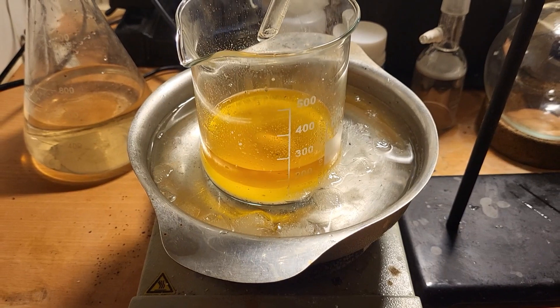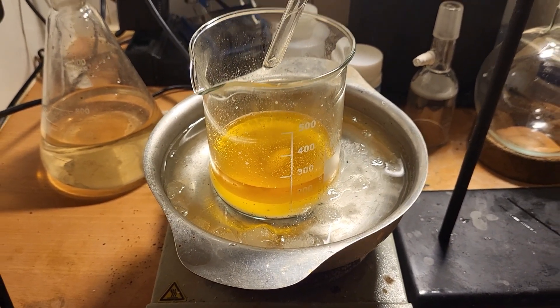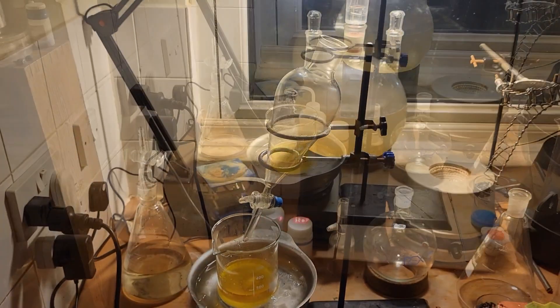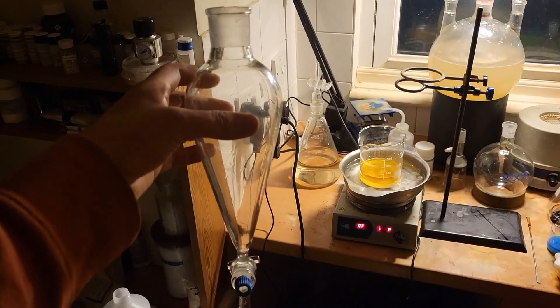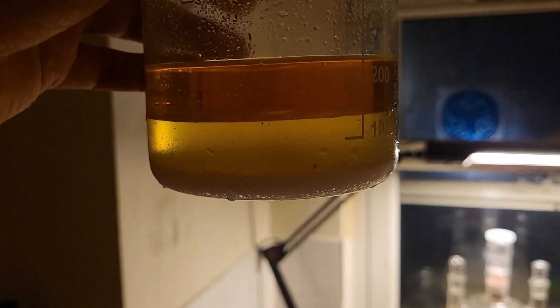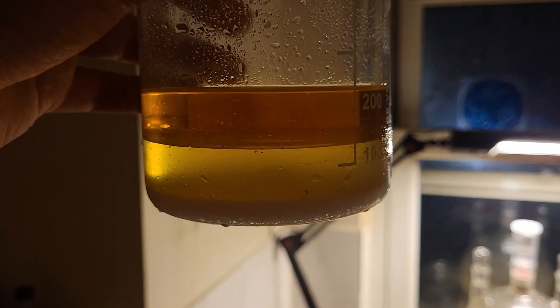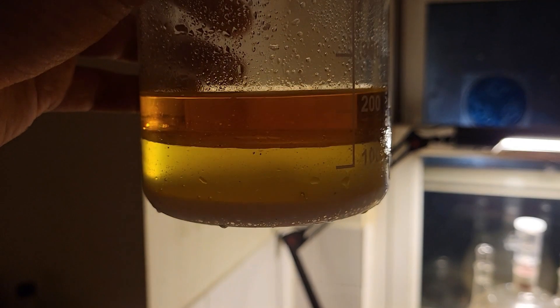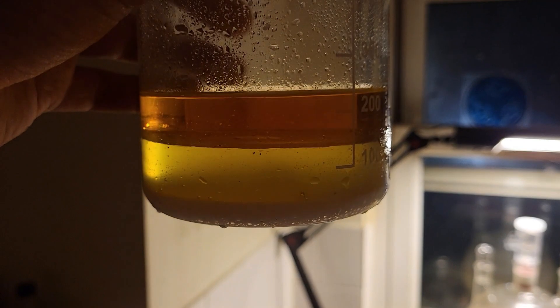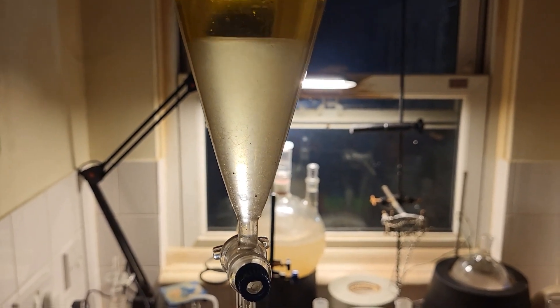Now the addition is complete. Like we did last time, we will fill this with the liquid. You can see there are two layers, and there is a slow decomposition.